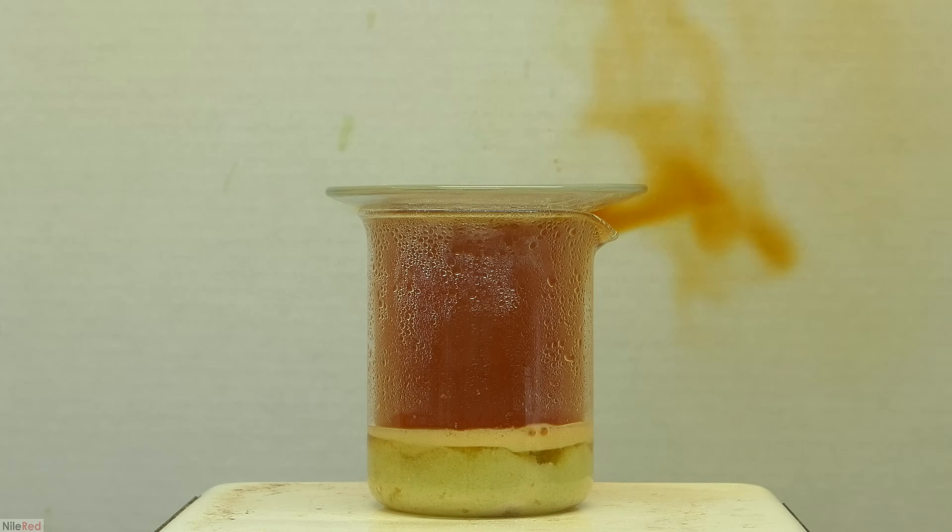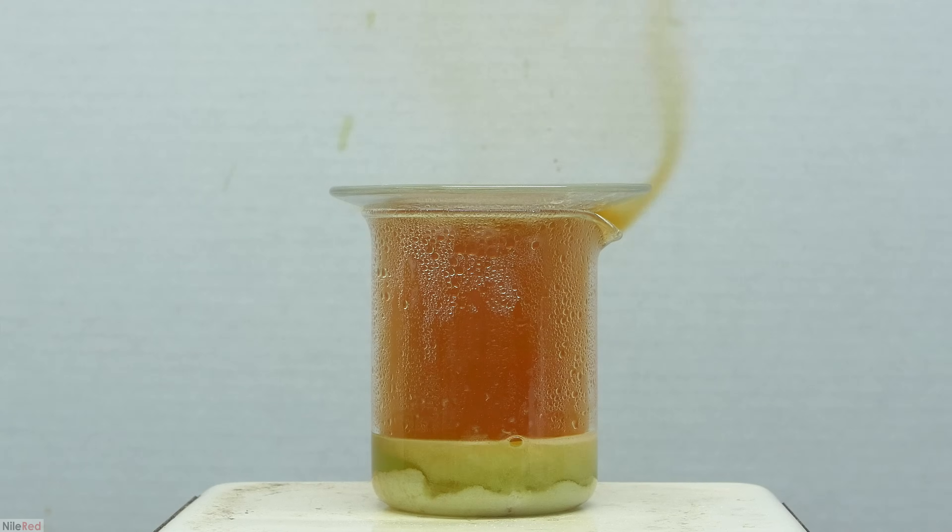When most of the silver has reacted, the reaction will start to die down and will start to dissolve some of the silver nitrate precipitate we see here. The reaction now is much less vigorous, but we're still just going to have to leave things until most of the silver has dissolved.